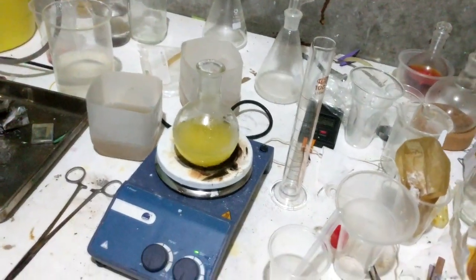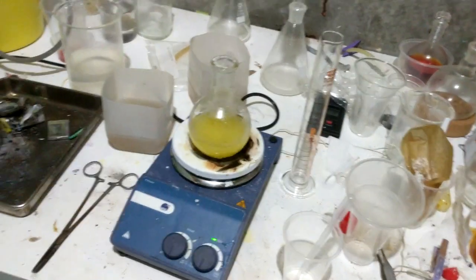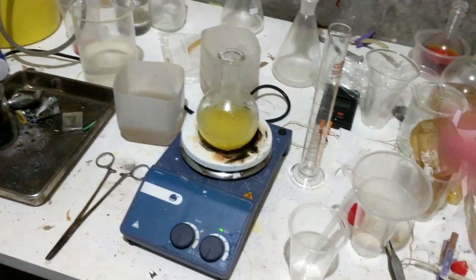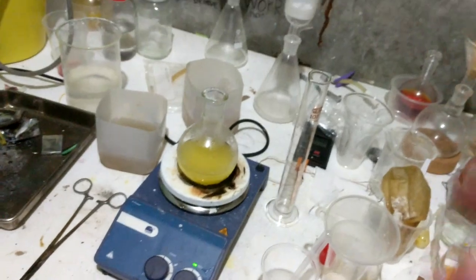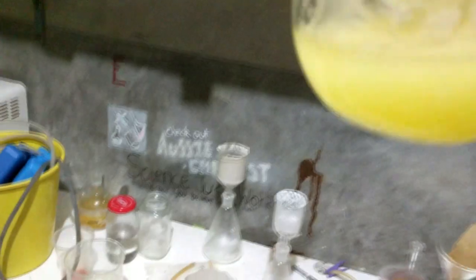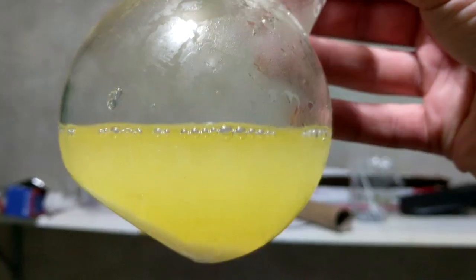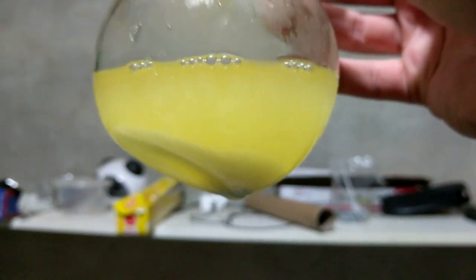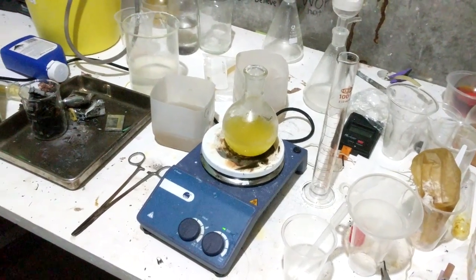I've added all the bicarb, and I had it on the ice bath because when I was adding the bicarb it was foaming because of the carbon dioxide coming off — I started getting a real nitrogen dioxide kind of smell and I was worried I was breaking down the diazotization intermediate. So I cooled it down in the ice bath while I added the rest of the bicarb. Now we have it and it's full of a precipitate. I don't want to get too optimistic but this looks exactly like I'd expect the tetrazole to look — crystalline sort of stuff. There's some excess bicarb down the bottom but that's what it looks like. Surely not... nah, I must have just crystallized something else out.